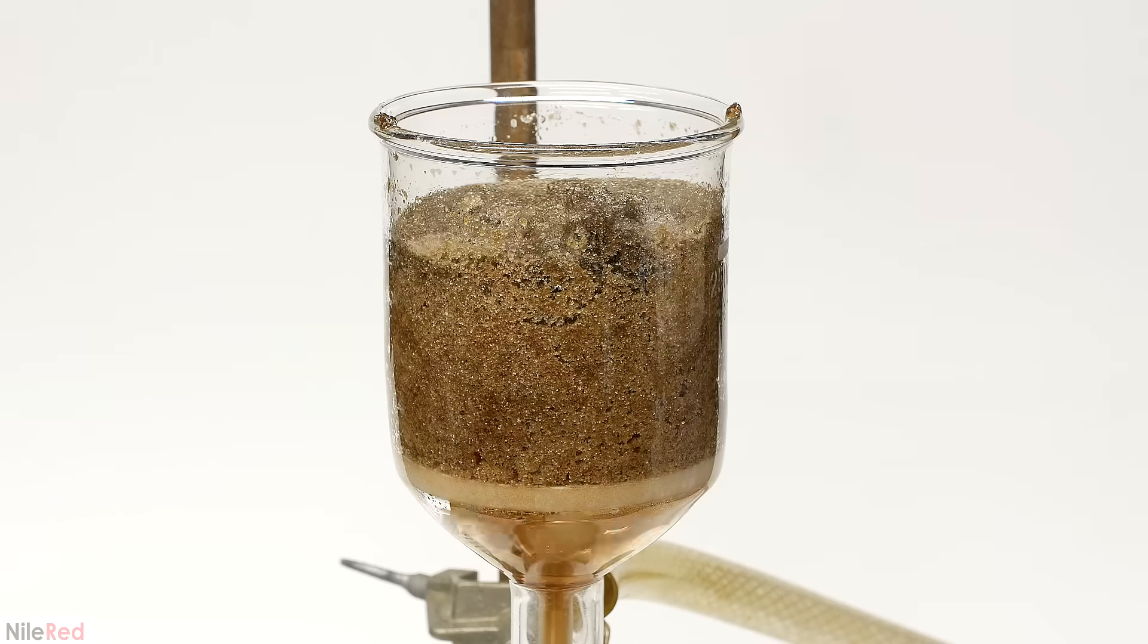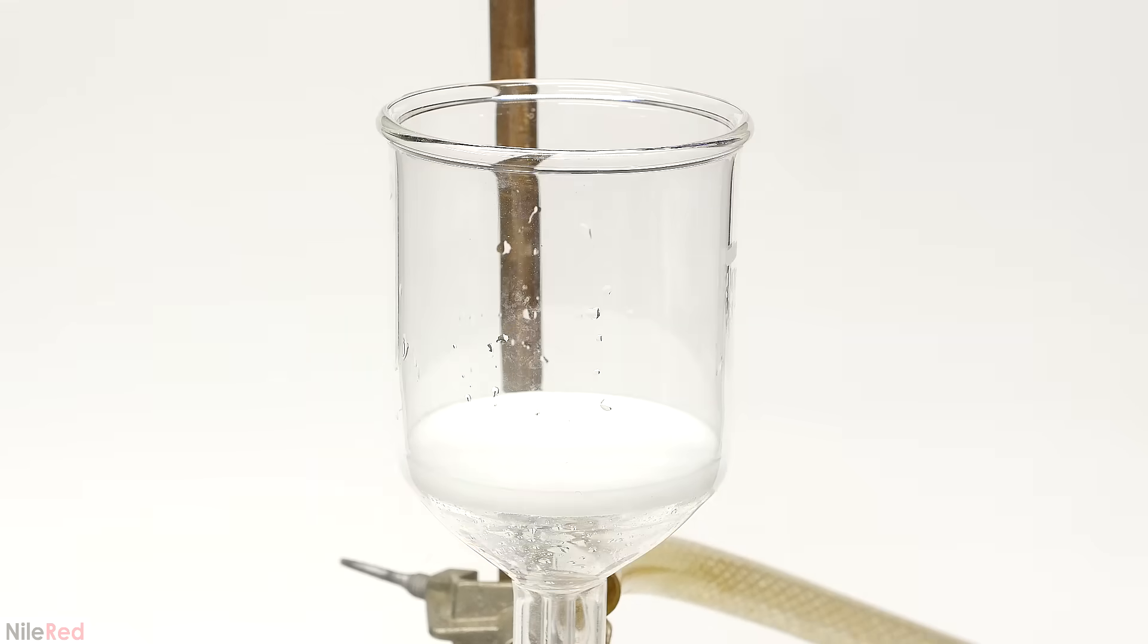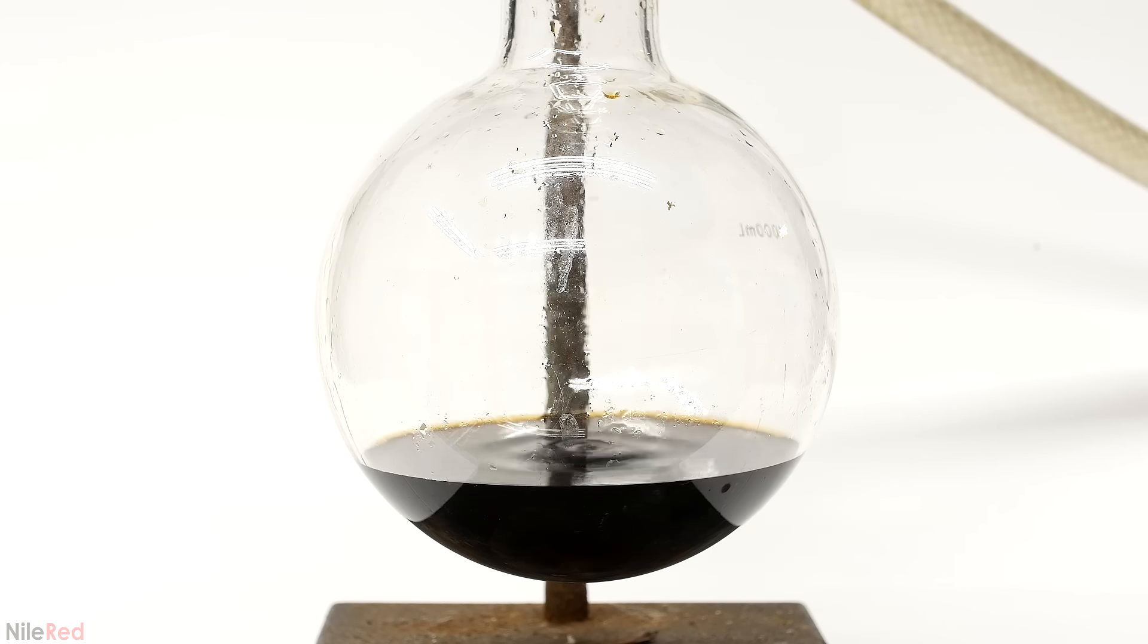I turn on my pump, and most of the dark concentrated pee is pulled out. It's all collected in the flask below, and thankfully, it can now be discarded. This is where all the stink is coming from, so from this point on, things are gonna be a lot more pleasant.